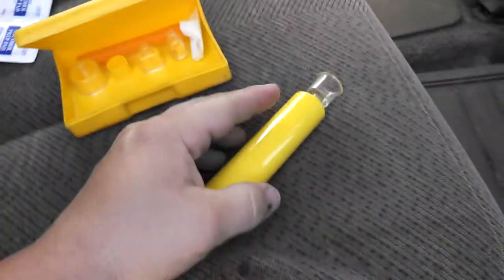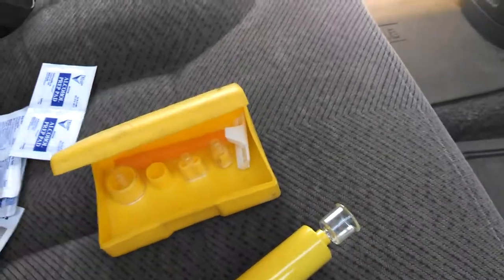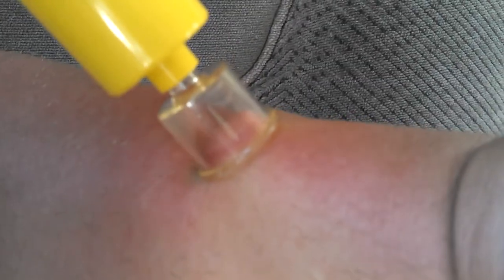This will fit on either way, so you can have a pinpointed area or a larger quarter-inch diameter area, all the way up to a one-inch diameter. I've got the little half-inch one on there. If I get stung right here, I take the extractor, put it over top of the injury, and push hard. It forms a vacuum - you can see it's drawing my flesh up into it. That's drawing out the toxins, the poison. See that mark? That draws out the venom, the toxins.